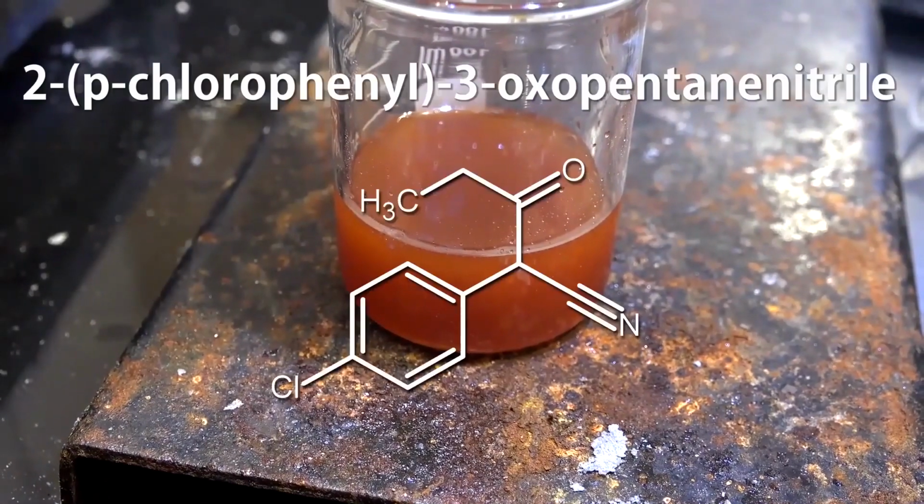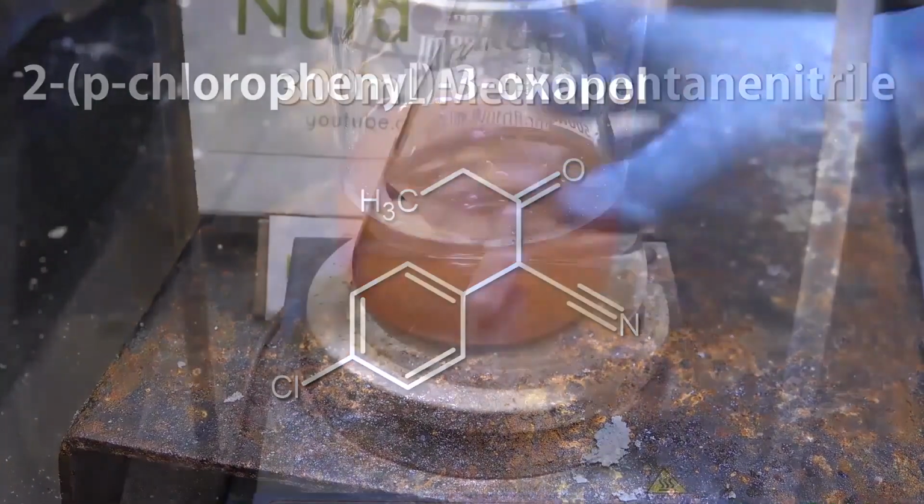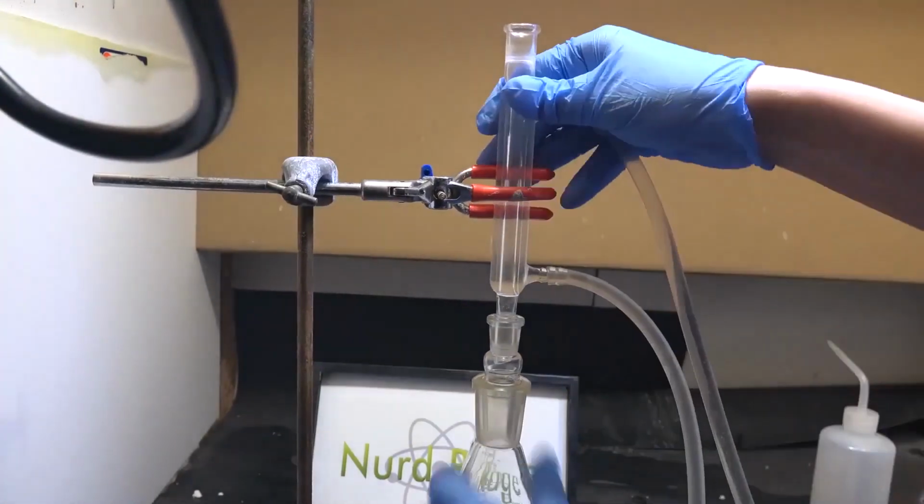We're going to make 2-para-chlorophenyl 3-oxopentane nitrile. First, we start with 300 milliliters of methanol dried and distilled from molecular sieves 3A as I've shown in a previous video. Set up on top a reflux condenser.